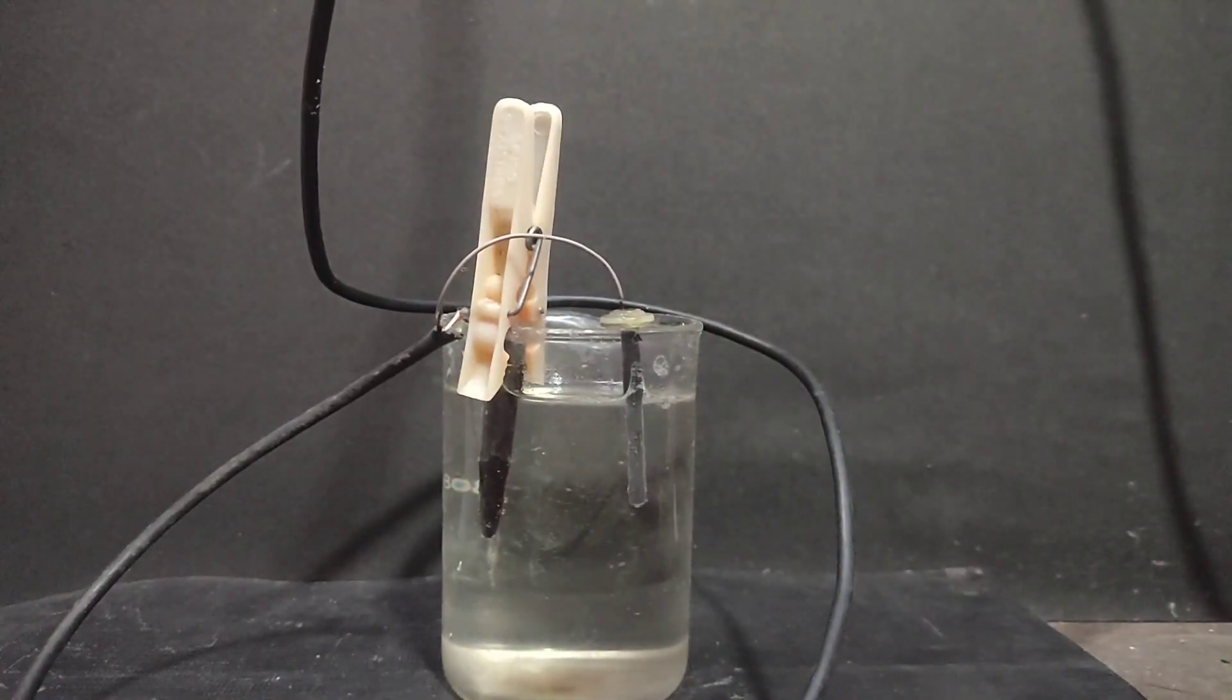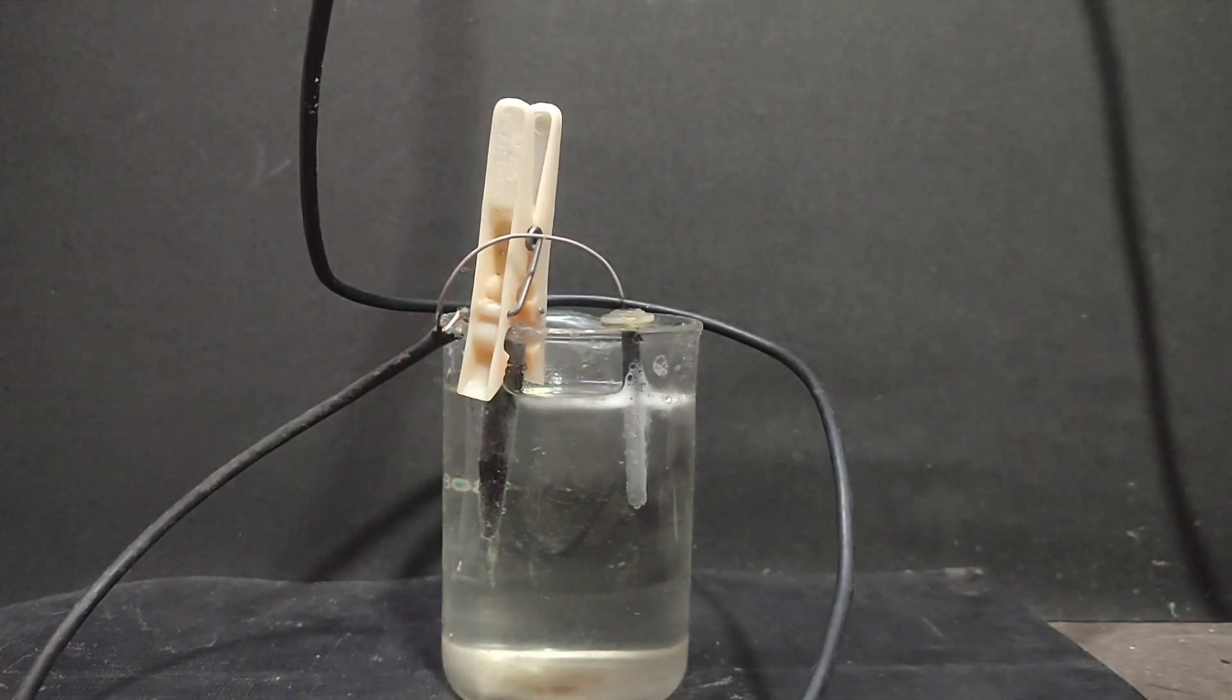Now I placed two graphite electrodes in the saturated solution and connected them with an 18 watt mobile charger. The thick electrode is the anode and the thin one is the cathode.